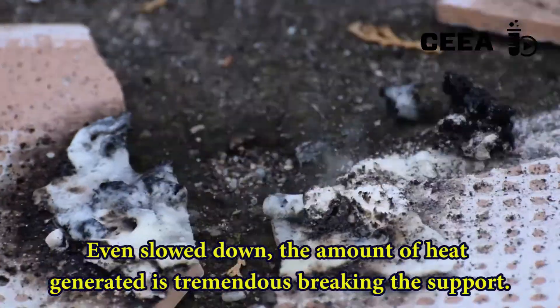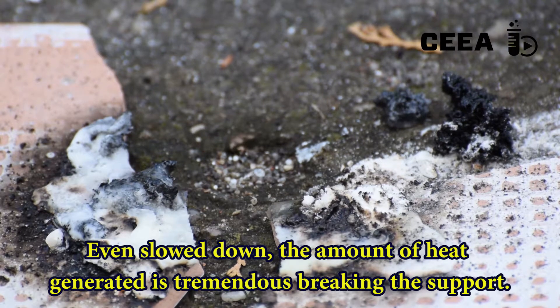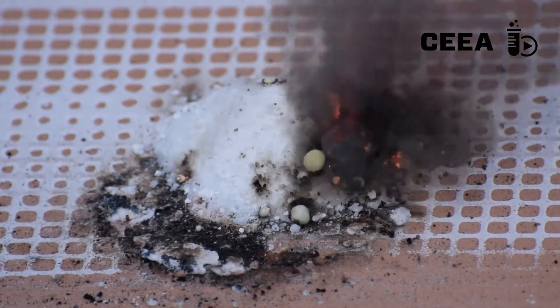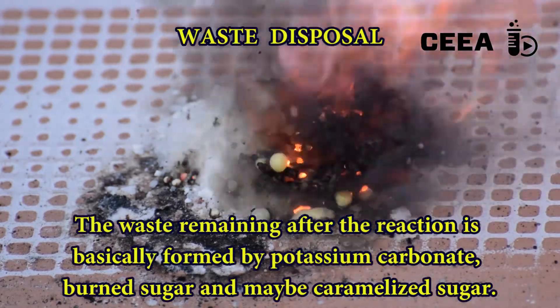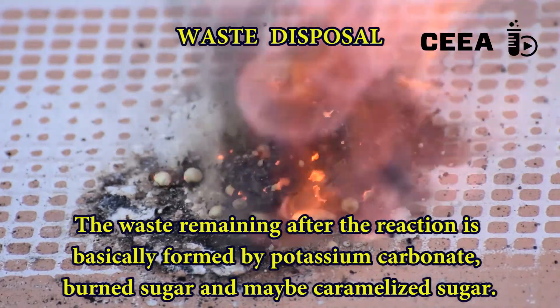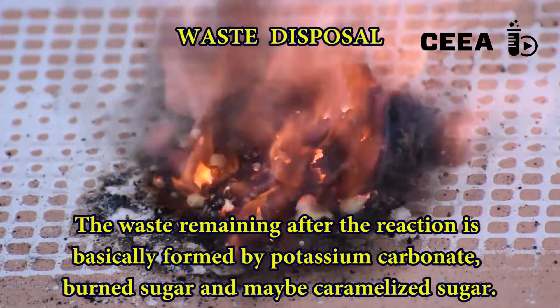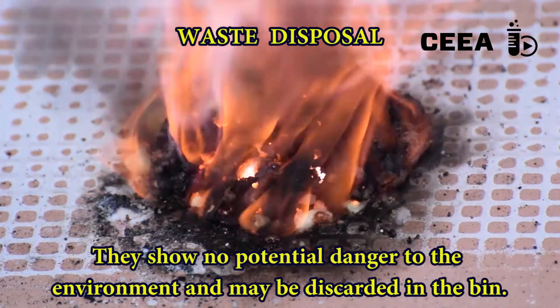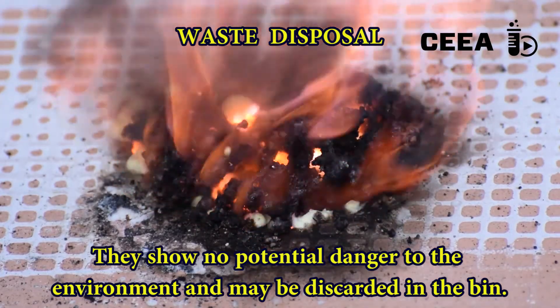Often the fire-resistant support is broken. During the reaction, potassium carbonate is generated along with amounts of burnt sugar. Discard them in a bin, as they don't show harmful potential.